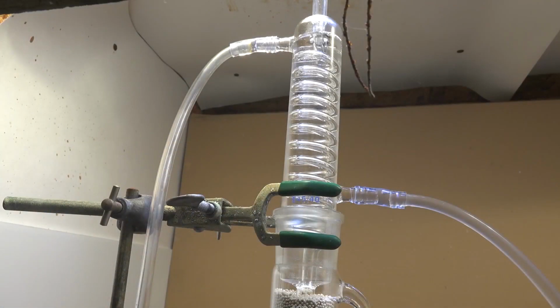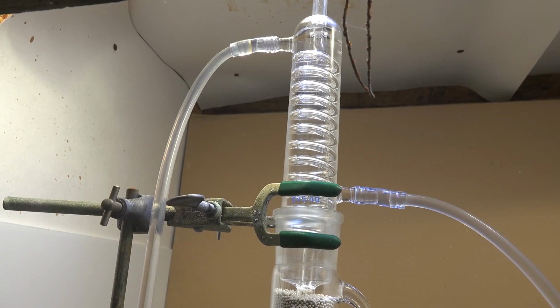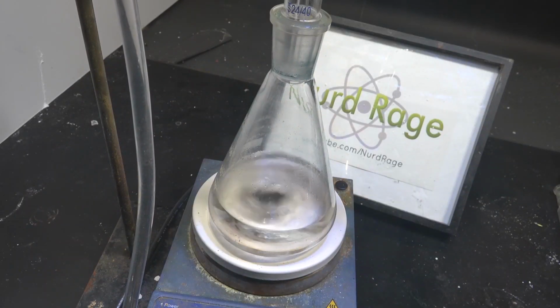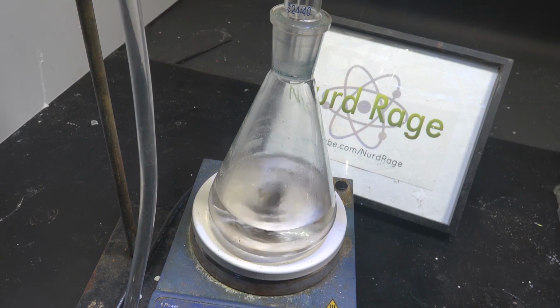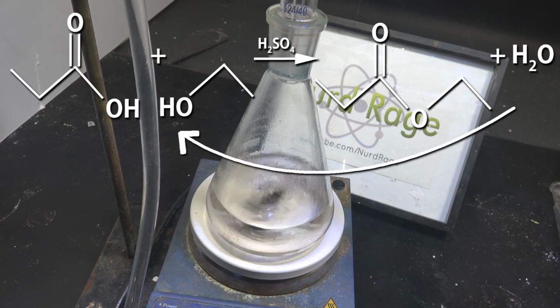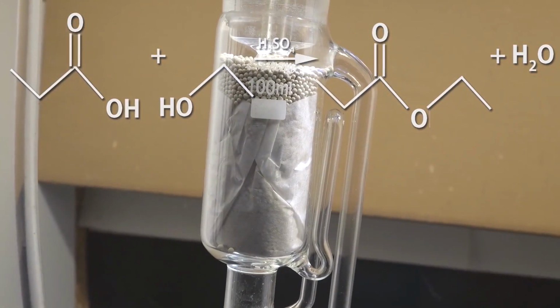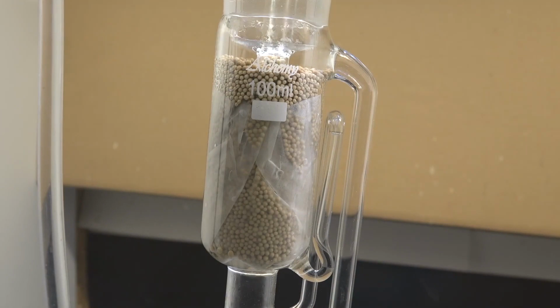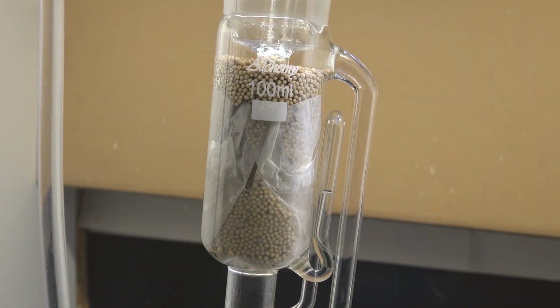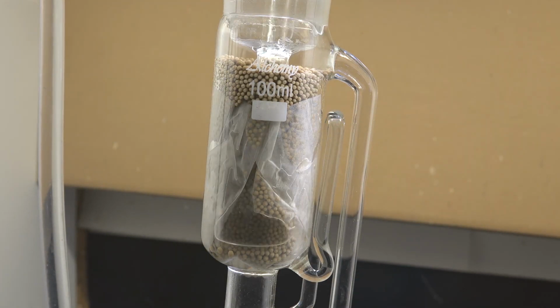Okay, once the apparatus is all assembled and the cooling water running, turn on the hot plate. Gradually raise the temperature until it starts to reflux and condense into the Soxhlet extractor. You don't need a very high turnover rate. Now, as said before, the reaction is reversible, so we can never get a good yield just at equilibrium. The Soxhlet extractor helps us get around this. By cycling the water, alcohols, and esters around the extractor, we can gradually remove all the water and only the water, without losing our alcohols or esters as we would if we just went with straight distillation.